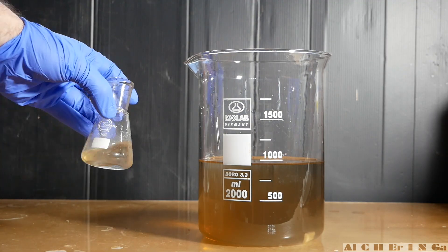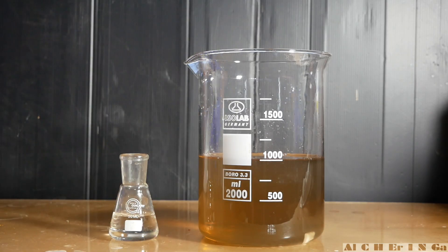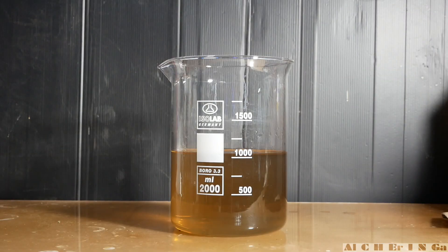Rinse out the reaction vessel with the 80 milliliters aqueous solution we divided earlier and pour it into the large beaker. Mix everything thoroughly.